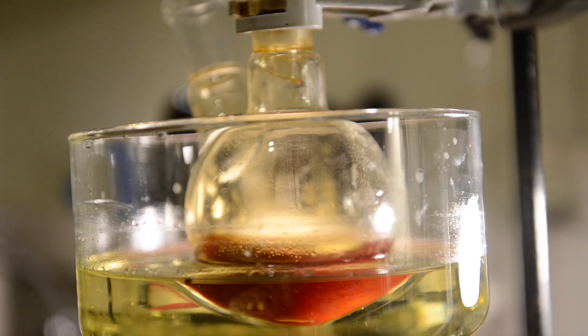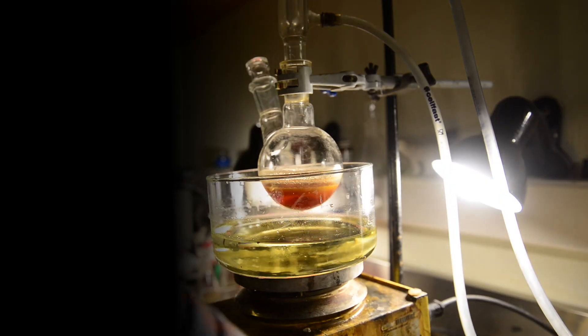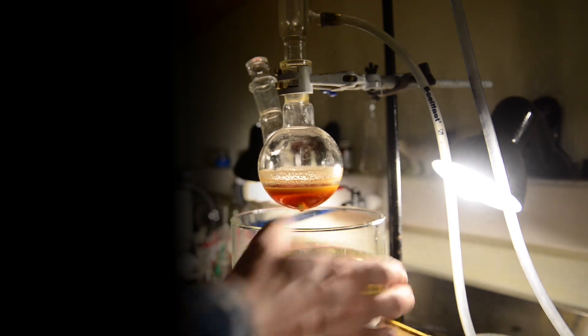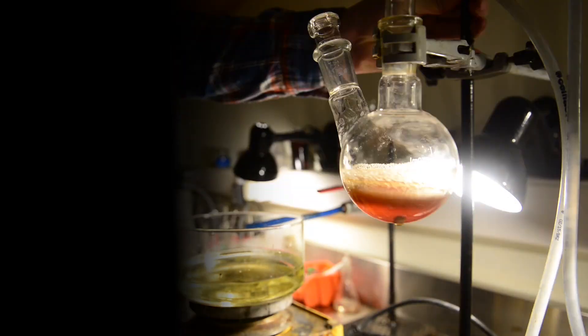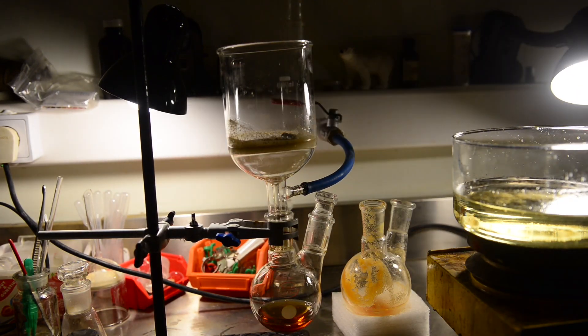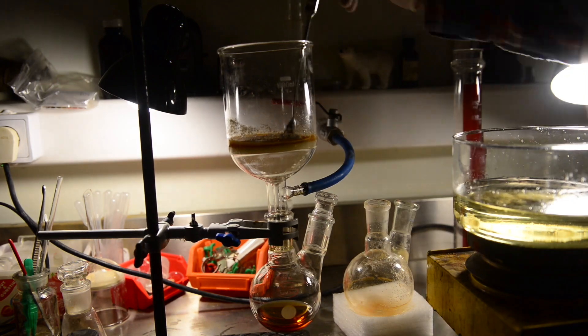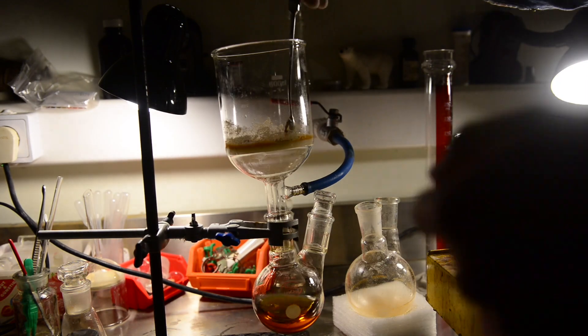After having 3 hours reflux done, we cooled down the flask to room temperature and we are starting the filtration process. We washed the reaction flask and the NBS on celite filter twice with 20 ml of chloroform.